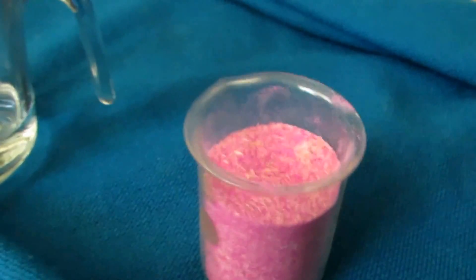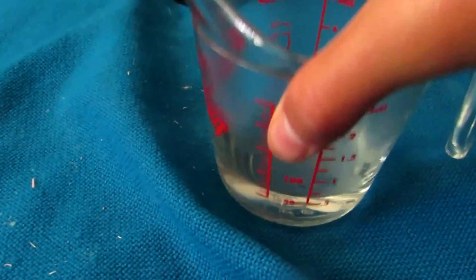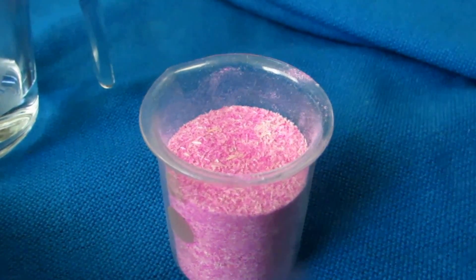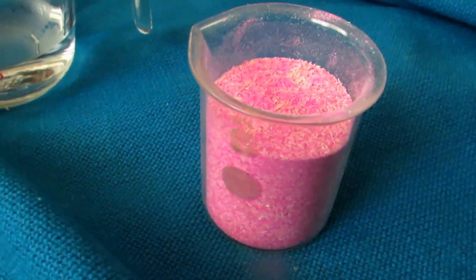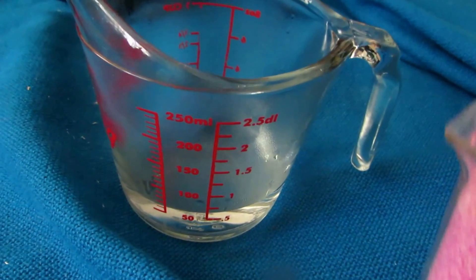I measured it on my scale and we have 34 grams of this powder. Now, 50 grams of potassium chlorate will dissolve in 100 milliliters of water at 100 degrees Celsius, so I just boiled some water. I only used 50 milliliters because match heads are composed of about 50% potassium chlorate, so we can assume less than 17 grams of this is actually potassium chlorate — accounting for the wood bits. So 50 milliliters should definitely dissolve all the potassium chlorate, and then we'll carry out a recrystallization after filtering.